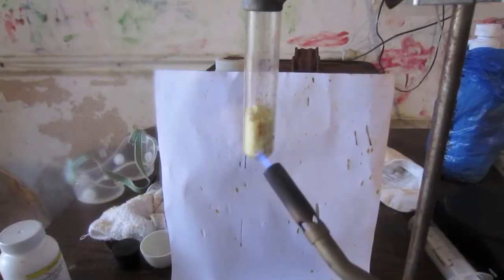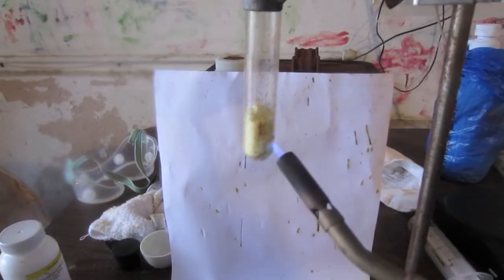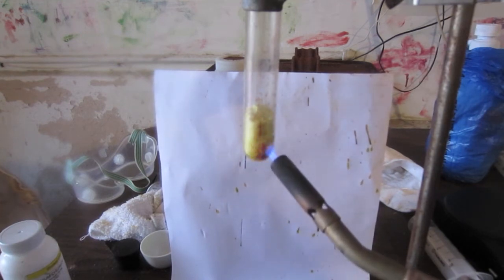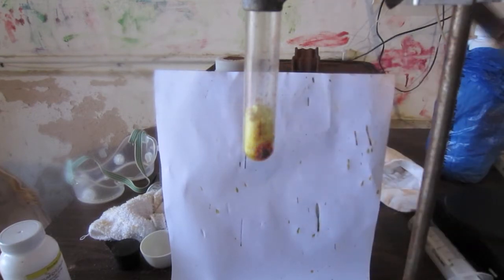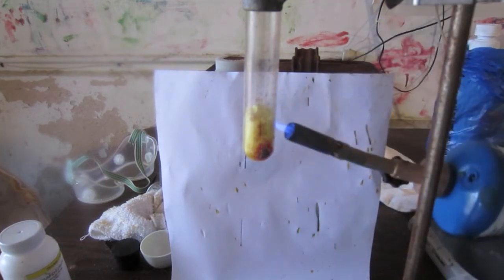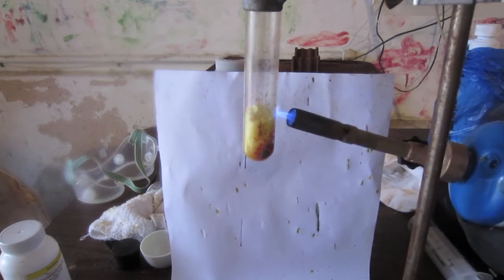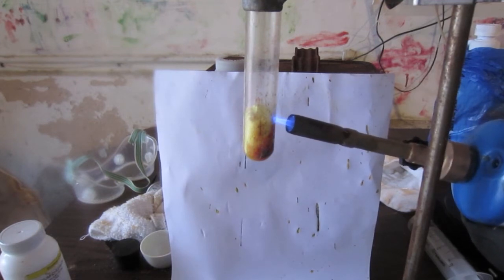Alright, so there is some yellow sulfur powder, which is rings of S8, oriented in the way that's most stable at room temperature. Now I'm heating it up, and it's melting, and the liquid starts out a light red, and then it slowly gets darker and darker and more viscous.